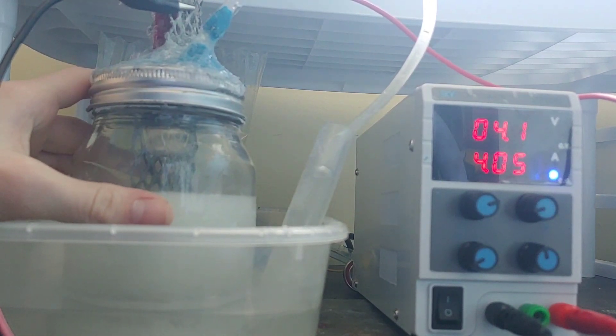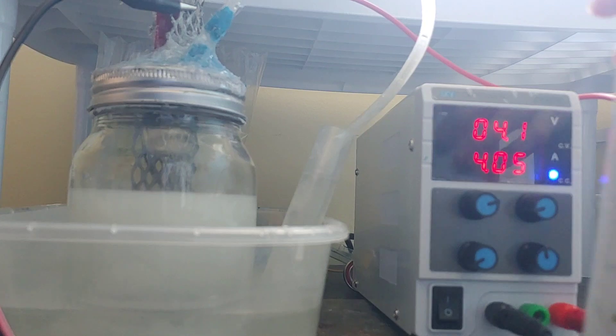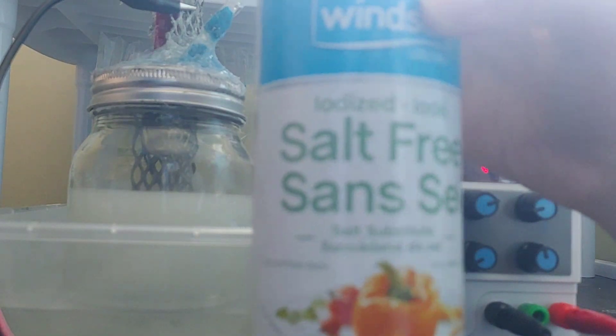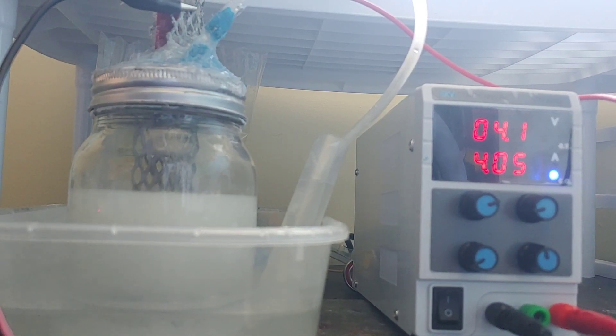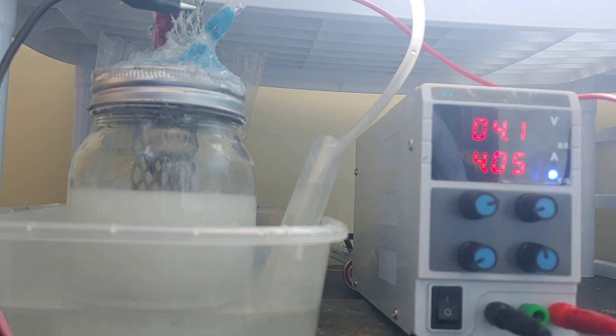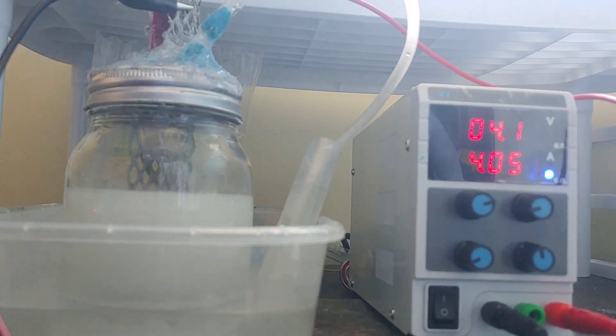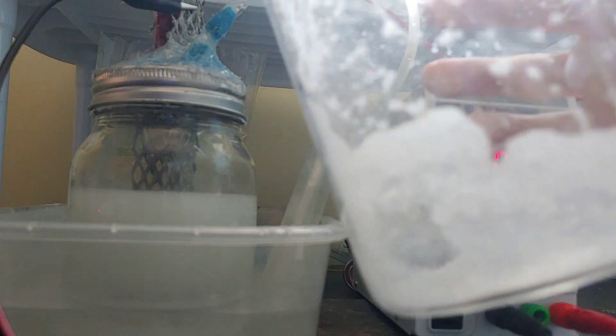And what I have over here is a nice potassium chloride solution. I got the potassium chloride from filtering this salt-free salt. It has so many impurities in it, I mean, god. Let's just take a look at a beaker from the leftover of the crap that was in here. Look. So much insoluble gunk, I mean, god.